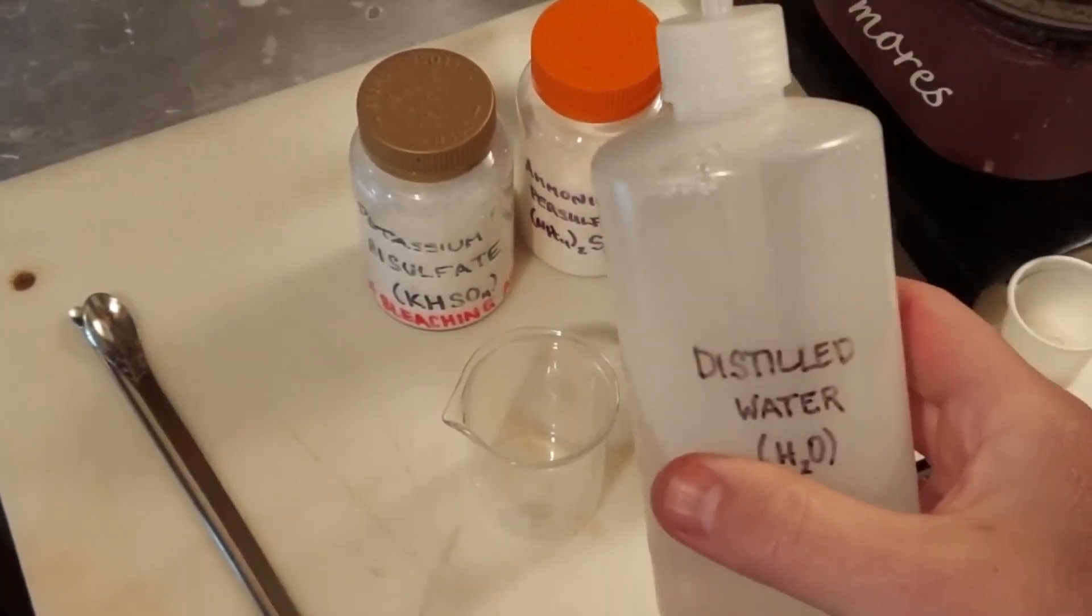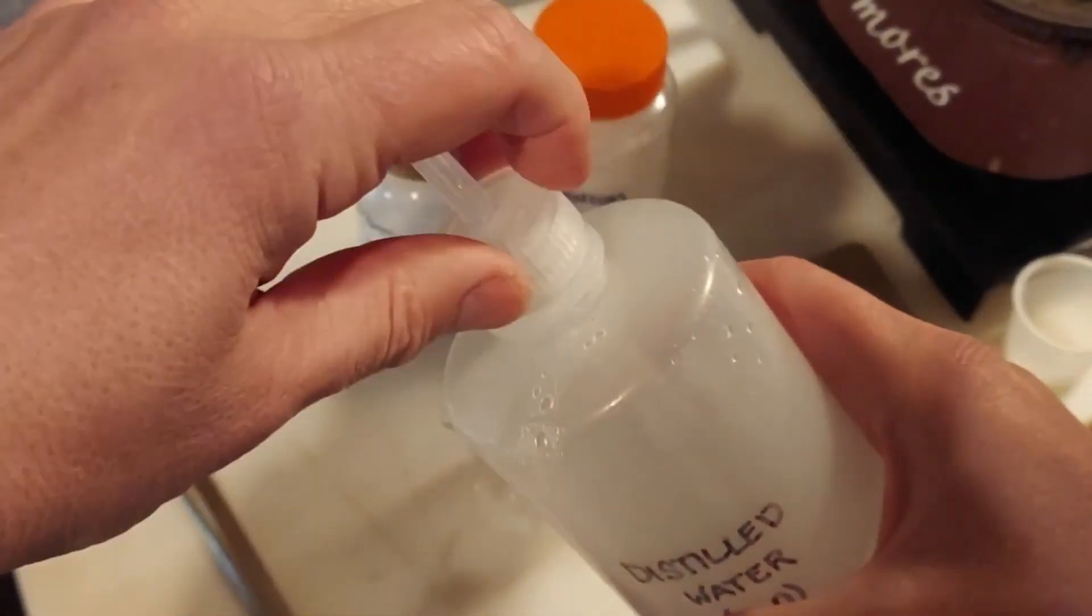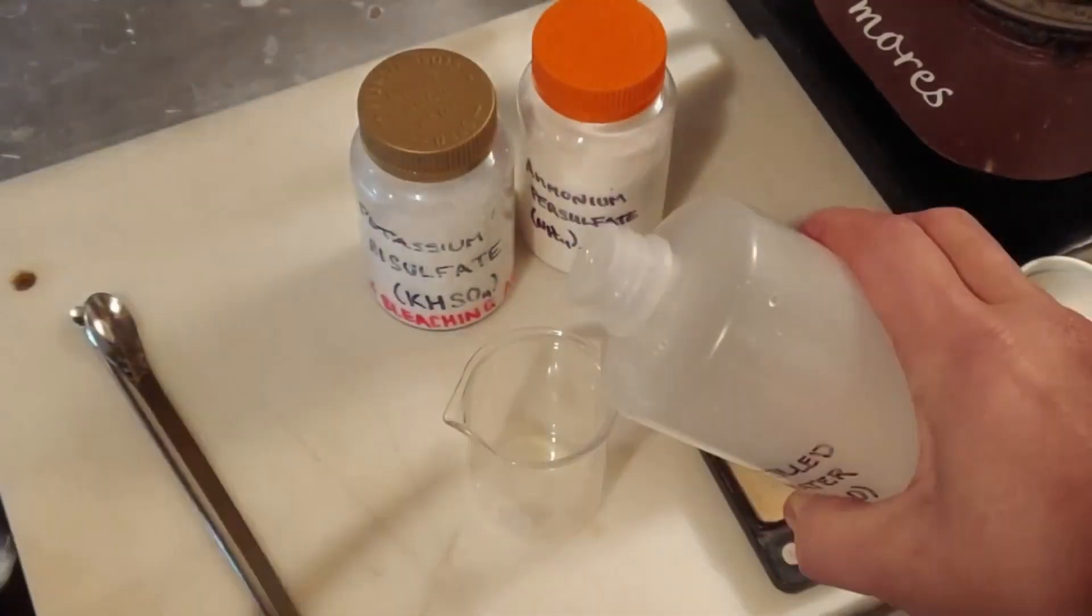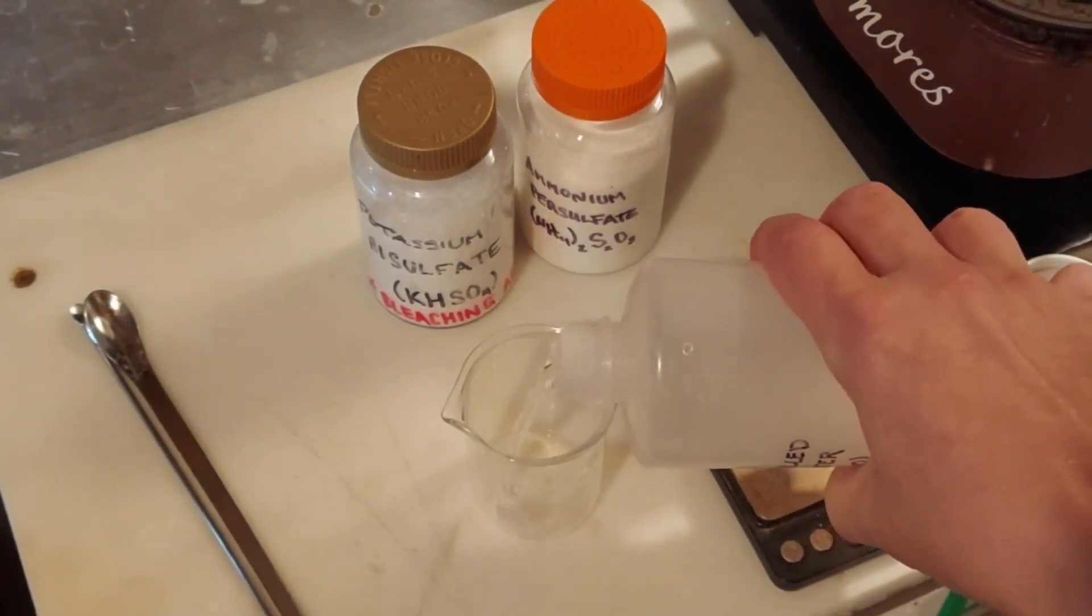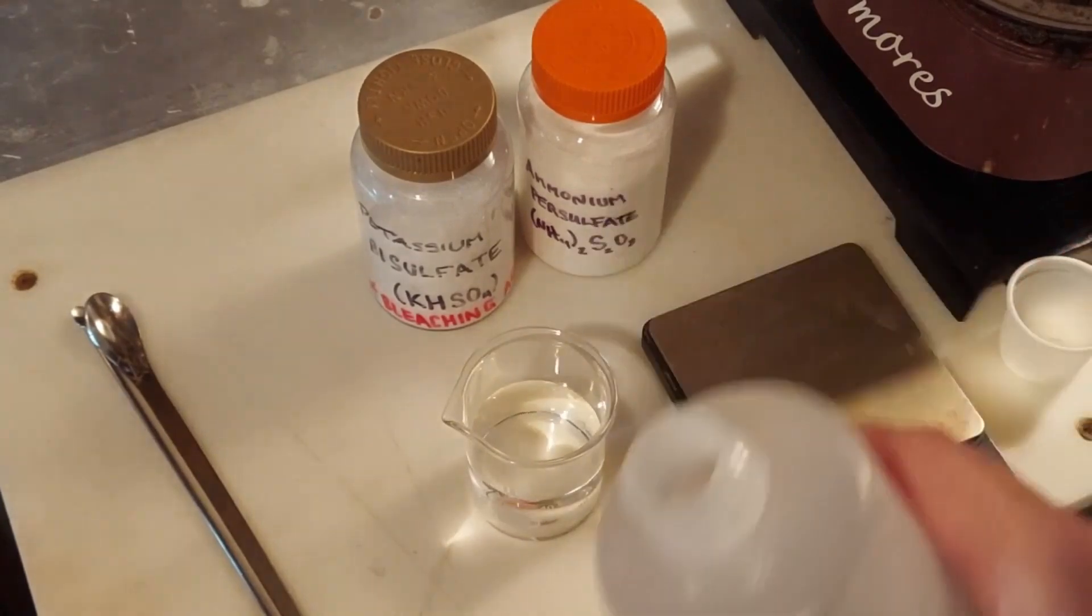The first step in making our potassium persulfate, of course, is the 60 milliliters of distilled water. I'm not going to squirt it out of here. That would take forever, honestly. But there we go.